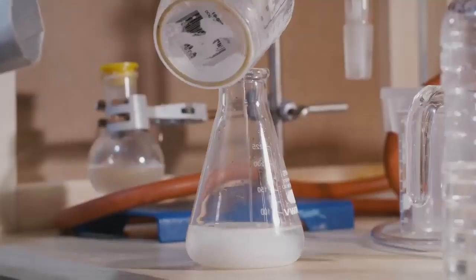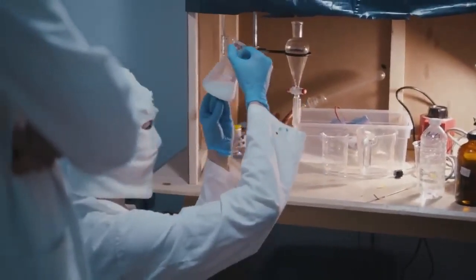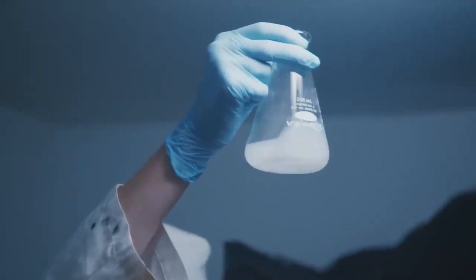Yeah, that's good. Oh my gosh, it's like crystalline too. You can filter that. Wow. So that's instant precipitation of DMT freebase. Exactly. I've never actually seen that happen. That's beautiful.